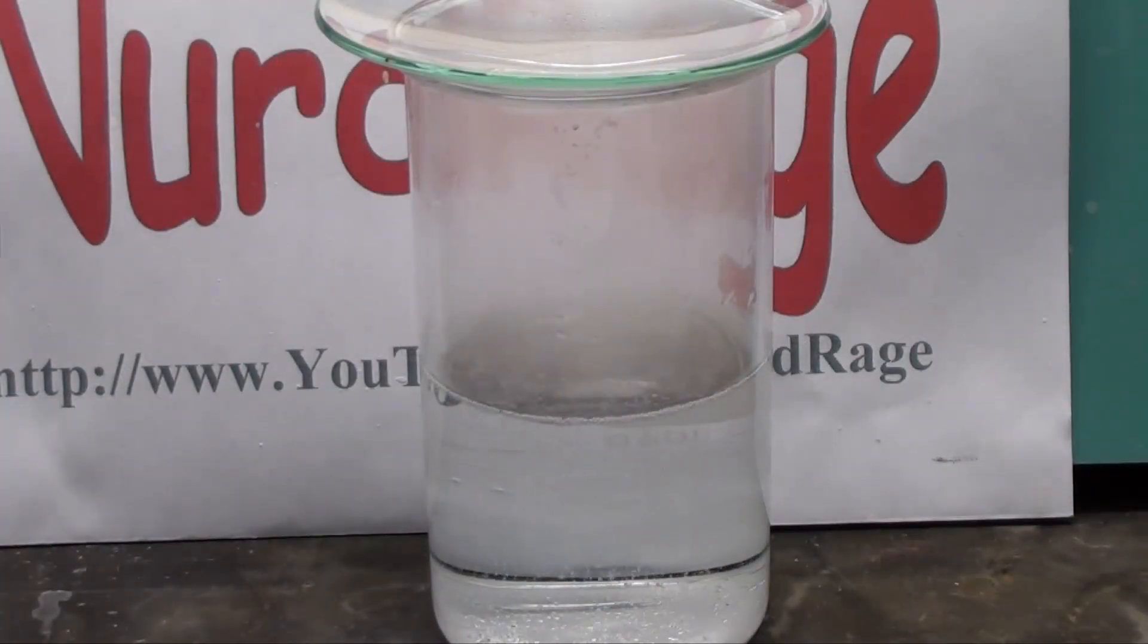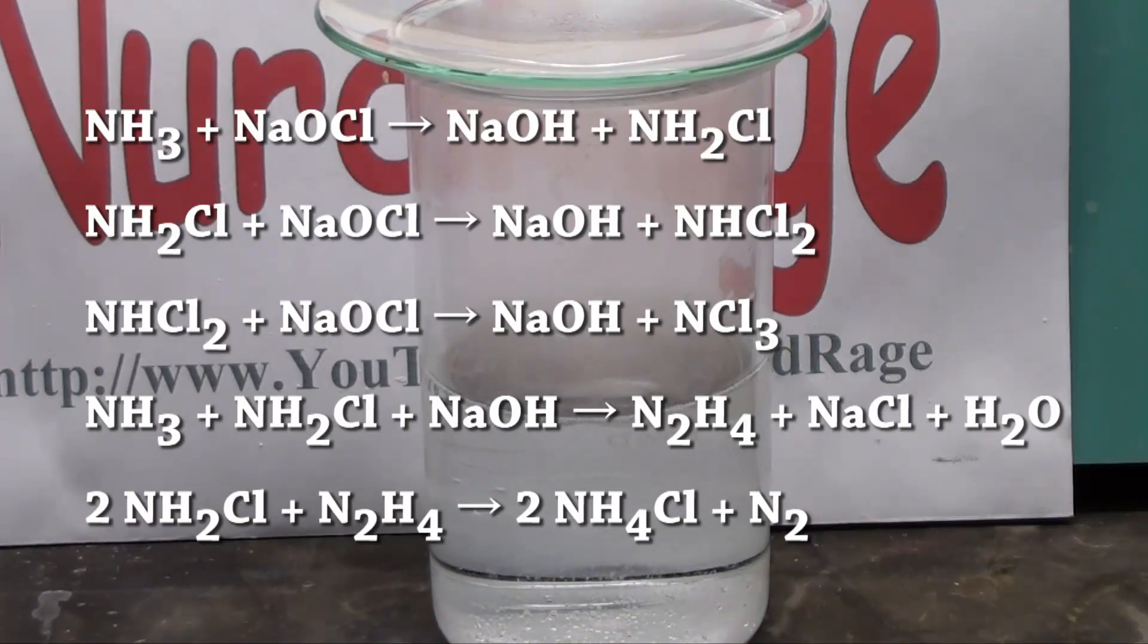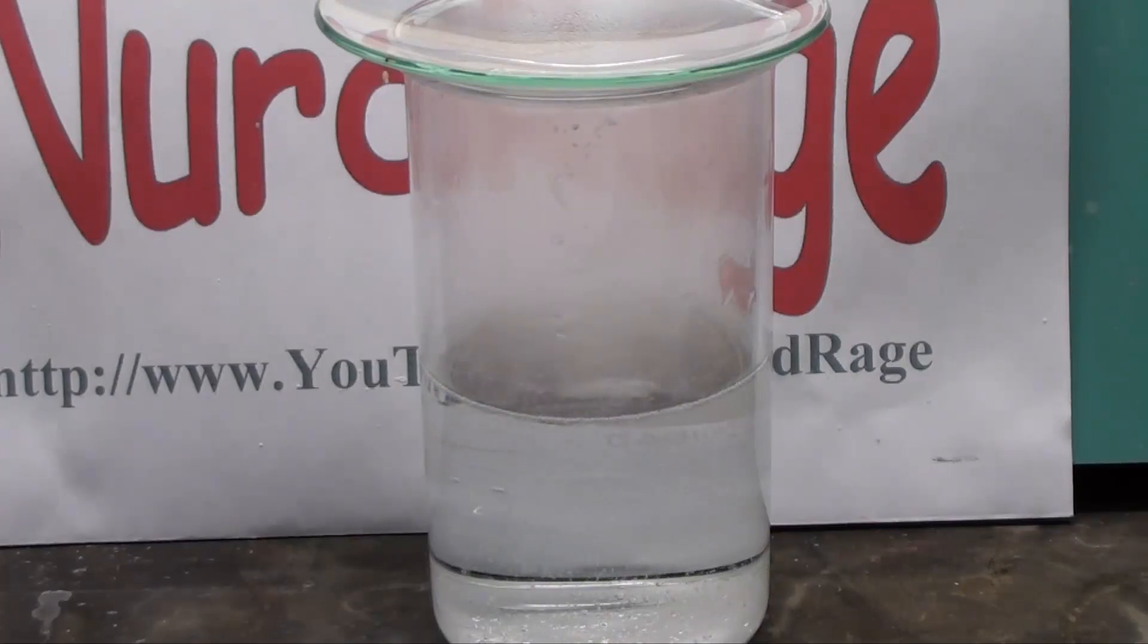As you can see here there is no yellow chlorine formation. But it is reacting though and producing many different products including nitrogen gas, and various toxic products such as traces of hydrazine, chloramine, dichloramine and nitrogen trichloride. So you still shouldn't mix ammonia and chlorine bleach, but understand that it's not making chlorine gas.